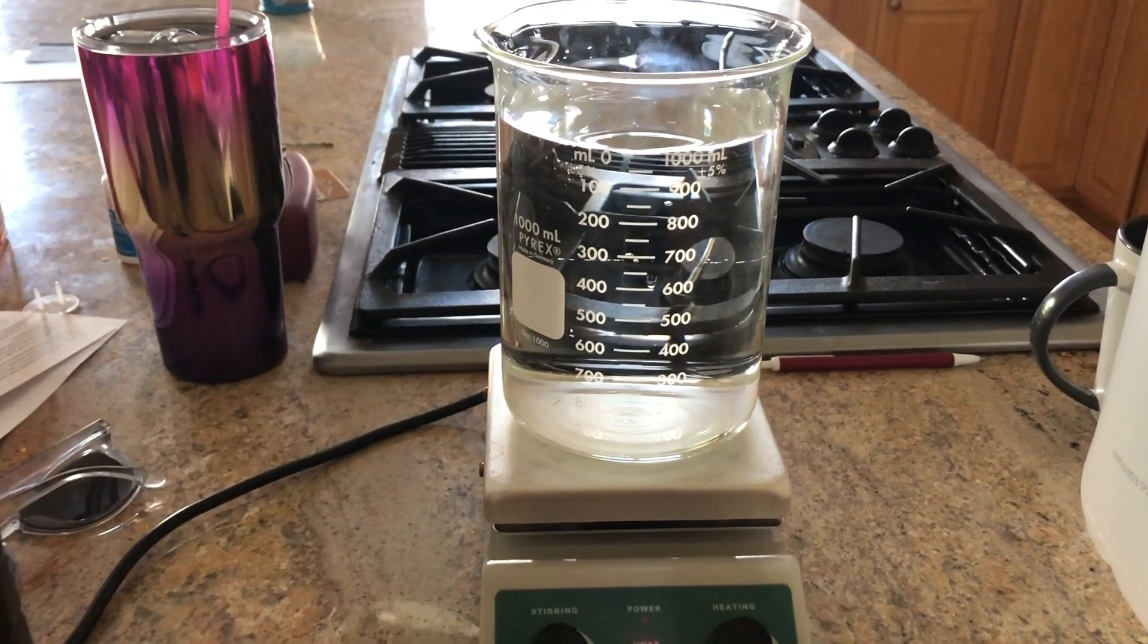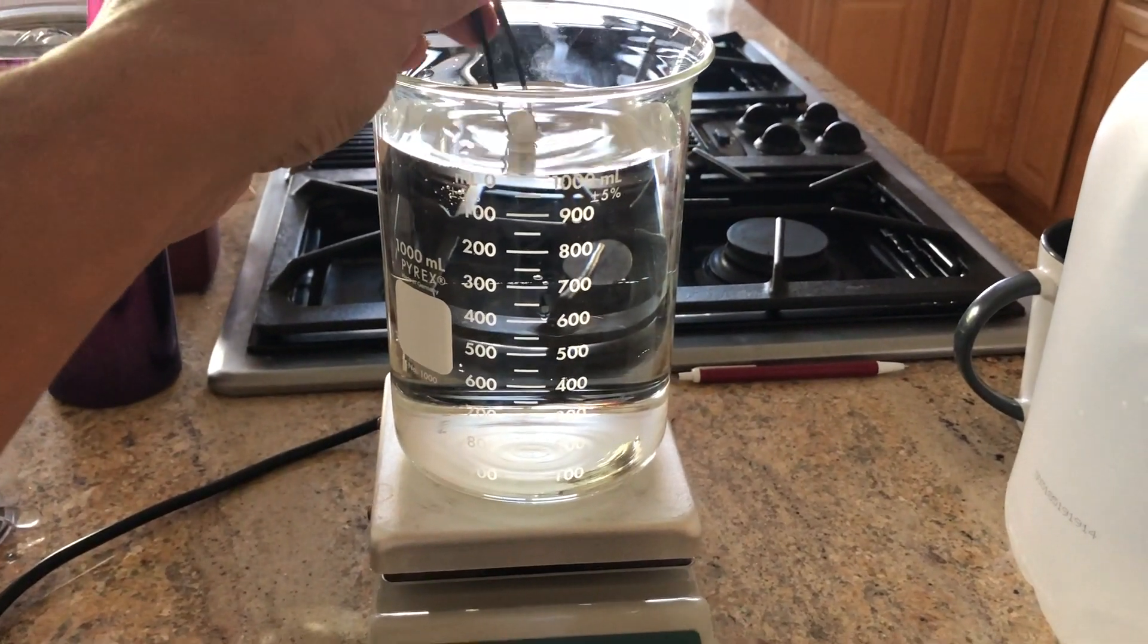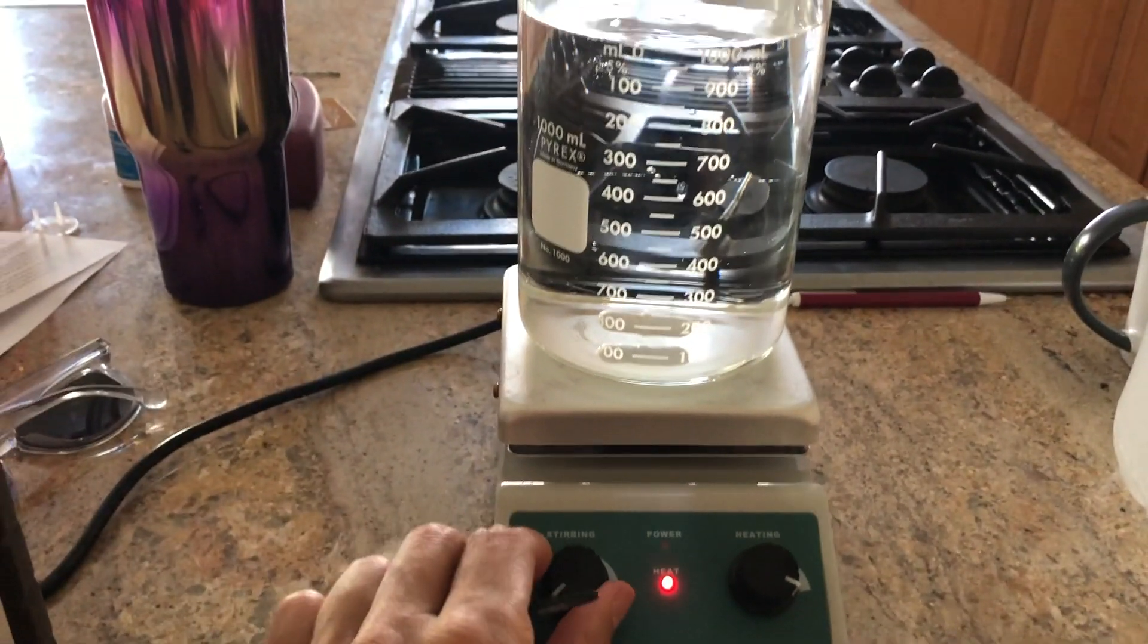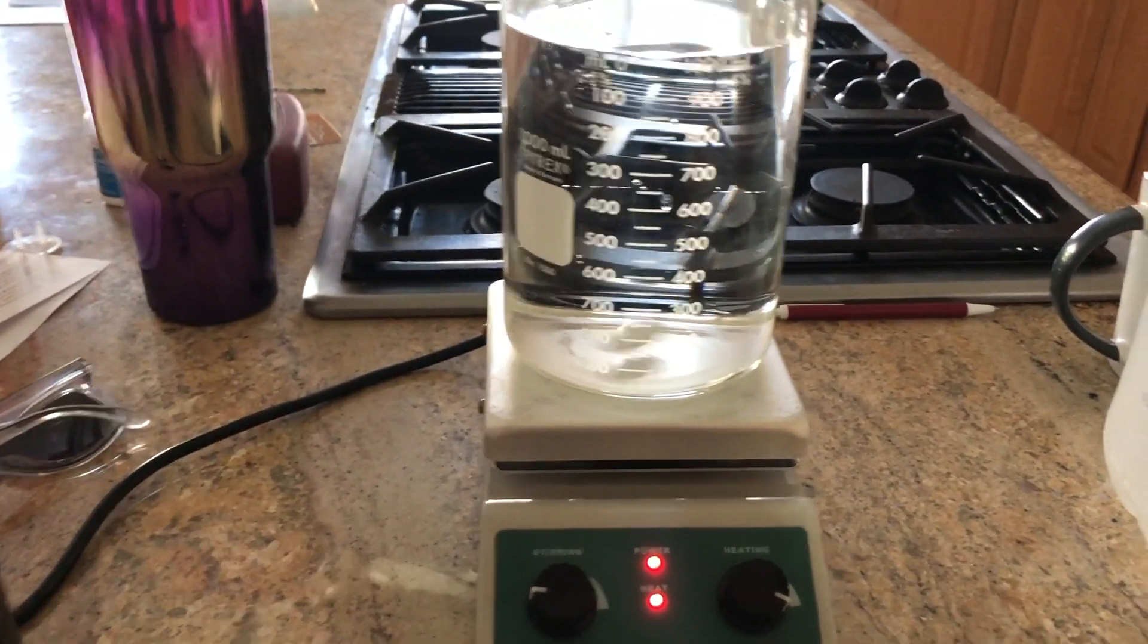This thing will only get to about 80 degrees Celsius. So it's not actually gonna be boiling water but the water will evaporate. I put in a little magnetic stirrer. We need that for the final step.